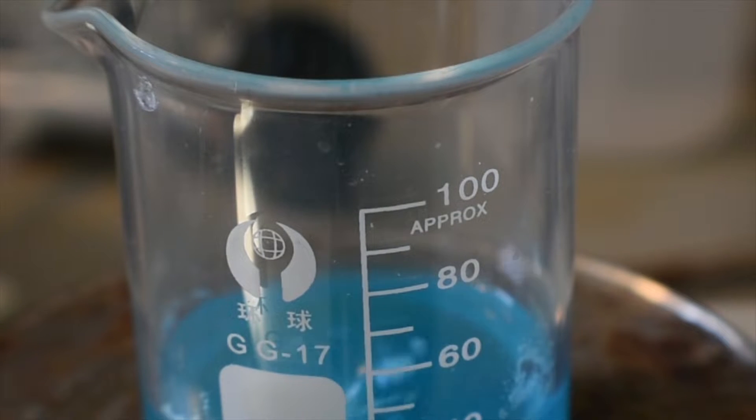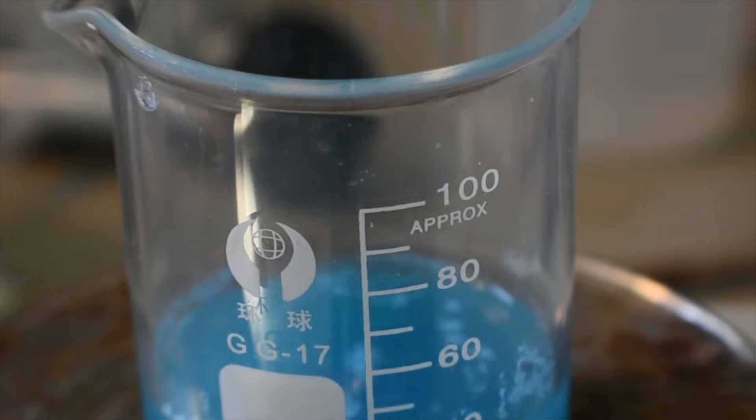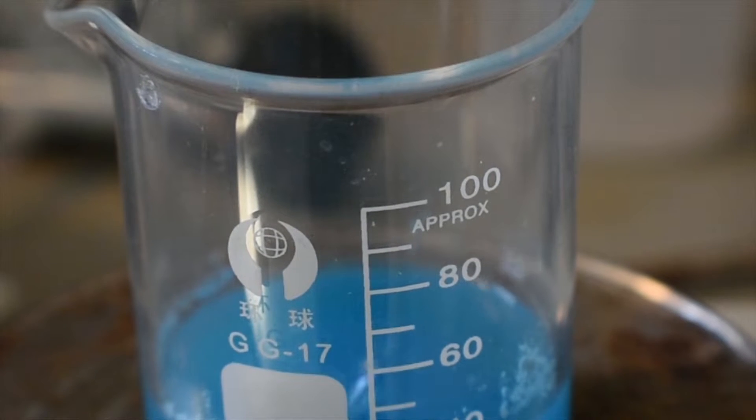As you can see, before I start to do that, like with most hydroxides, this copper hydroxide has reacted with CO2 in the atmosphere to form copper carbonate, which you can see forming a small amount of CO2 whenever it is added. You could probably just hear it.